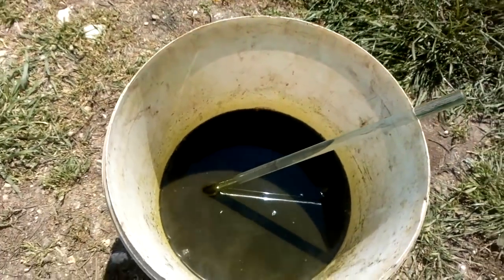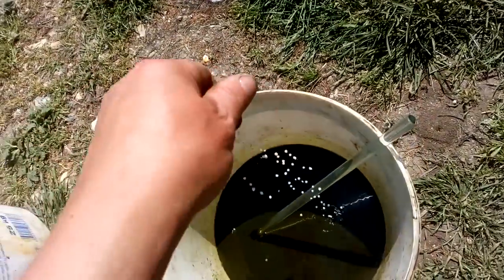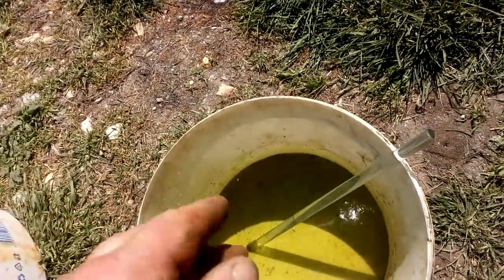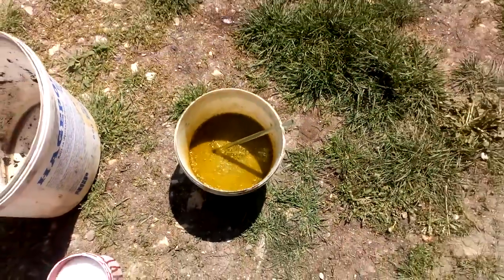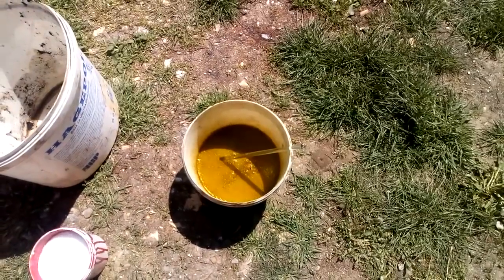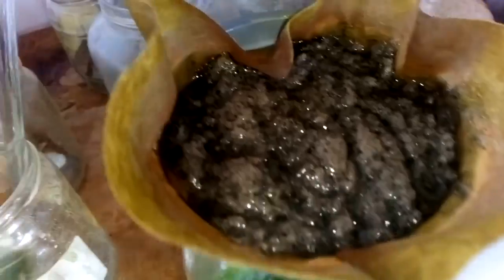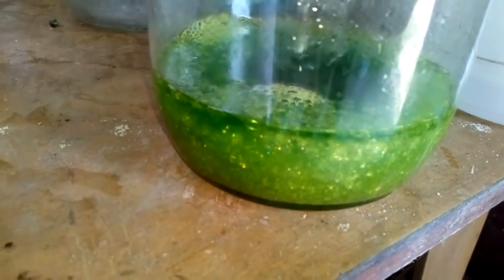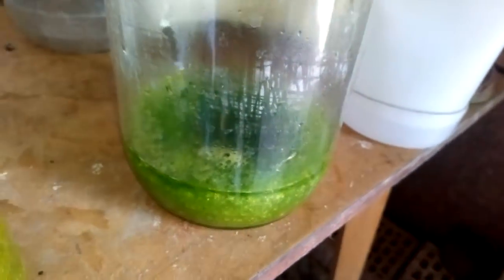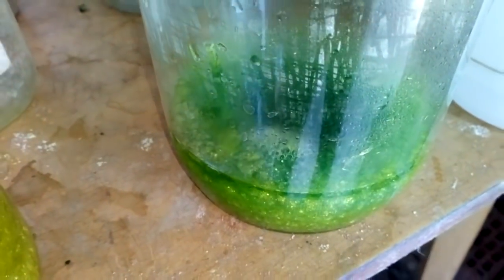Okay, after the reaction is complete, we add some urea — extra nitric is removed while it's still hot. Okay, we start filtration. See all that sludge. This stuff on the bottom is actually crystallized urea, but no problem — we add some fresh distilled water and the urea will dissolve.